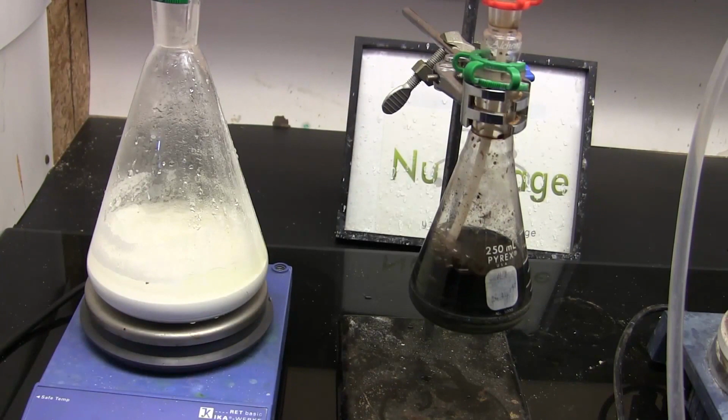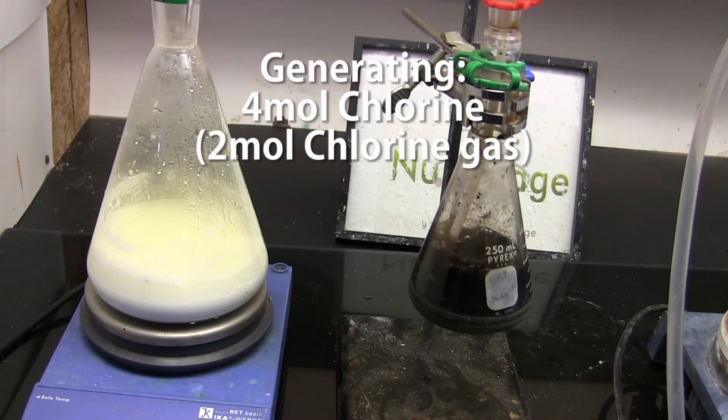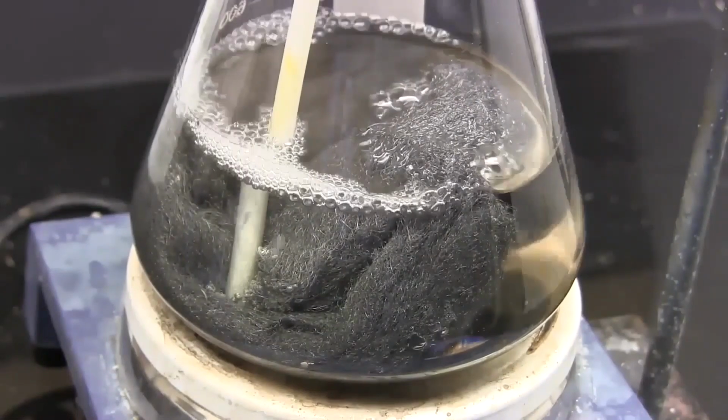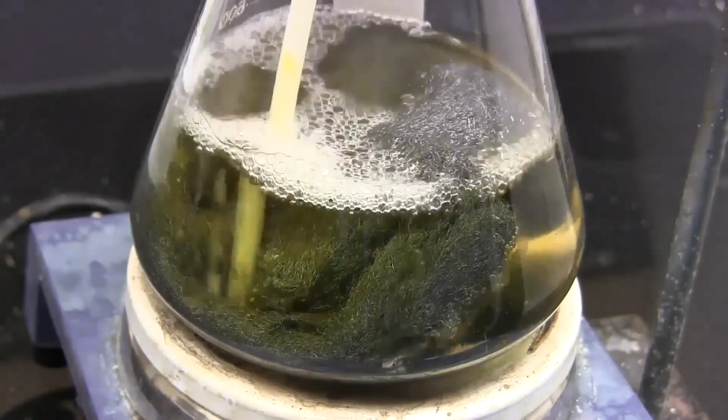So let's get started. First, we drip in the hydrochloric acid, and we can see the yellow chlorine gas forming. I'm using enough reagents to produce 4 moles of chlorine atoms, or 2 moles of diatomic chlorine gas. It'll take a minute or so for the air to purge out the tubes before the chlorine gets to the toluene. And there we go.